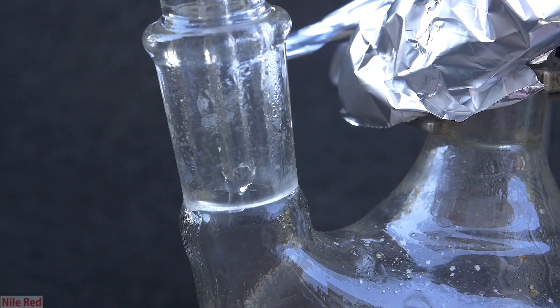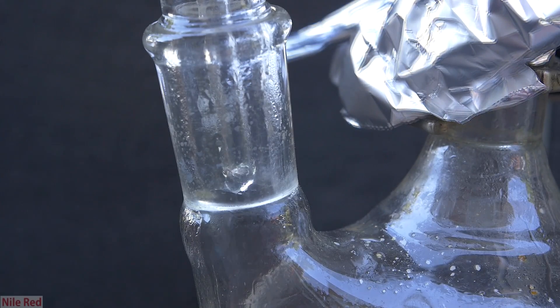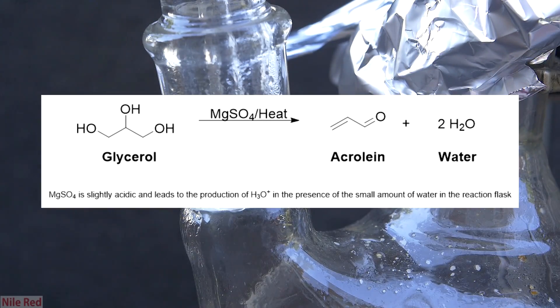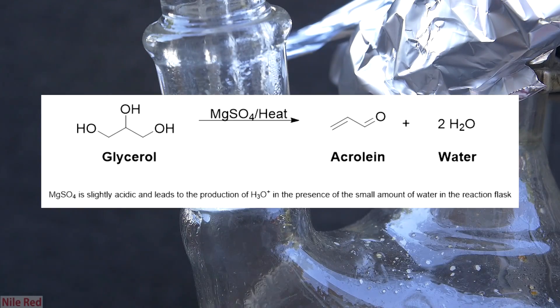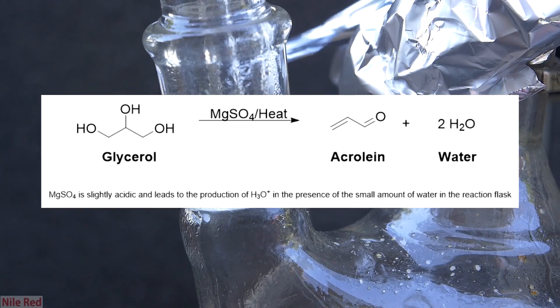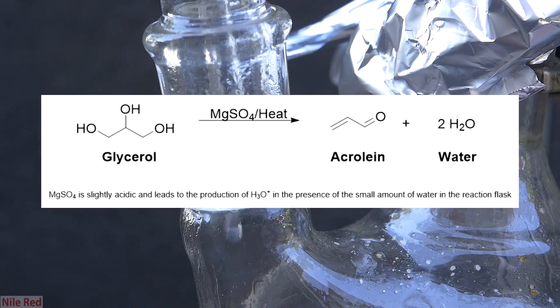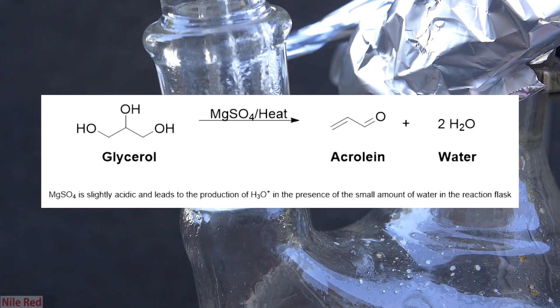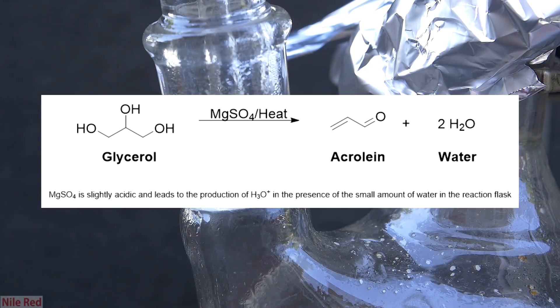As we heat our mixture of magnesium sulfate and glycerol, our glycerol is catalytically broken down into acrolein and water. The reaction is catalyzed by our slightly acidic magnesium sulfate salt, and it proceeds in two distinct dehydration steps.